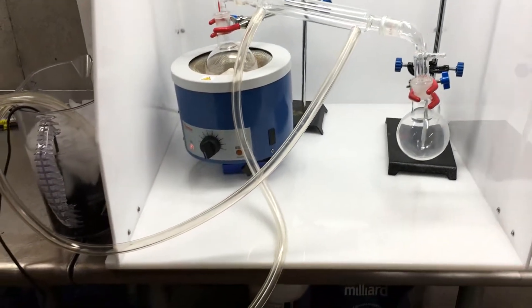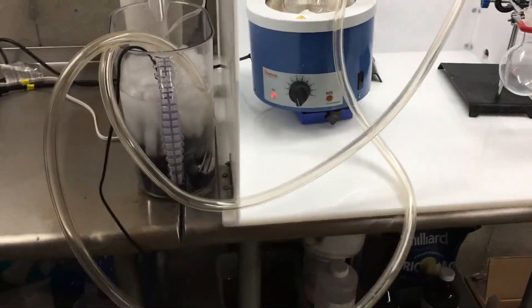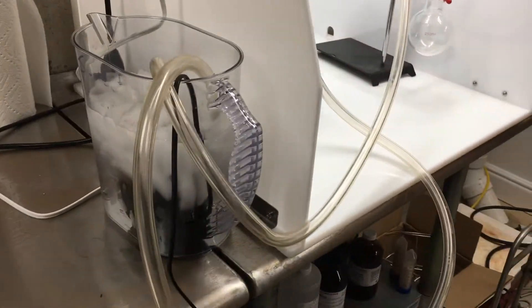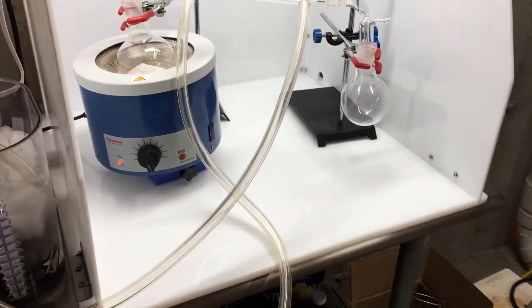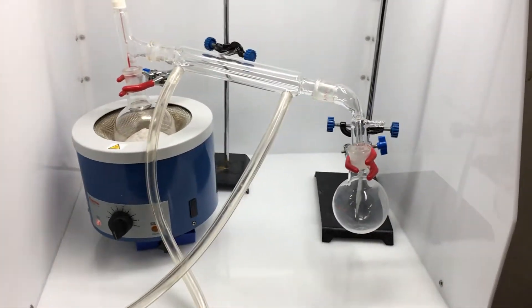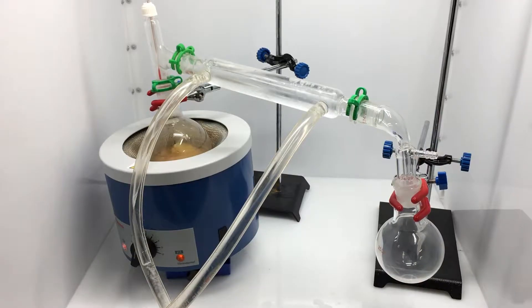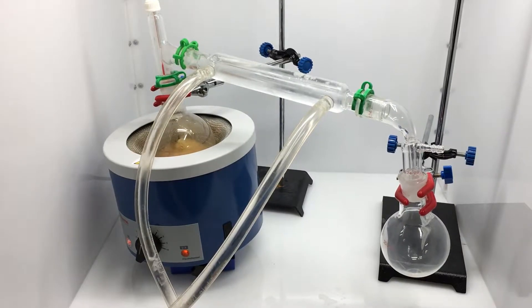The next thing that you want to do is set up for a simple distillation. Make sure to always do it in a fume hood or at least outside, and if you do it outside you will want to wear a gas mask.